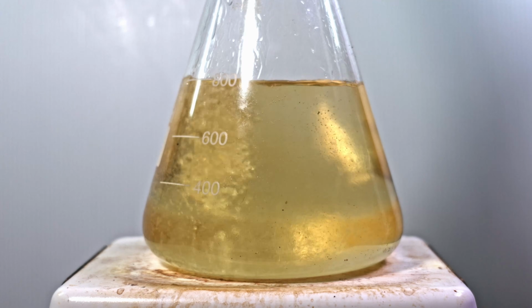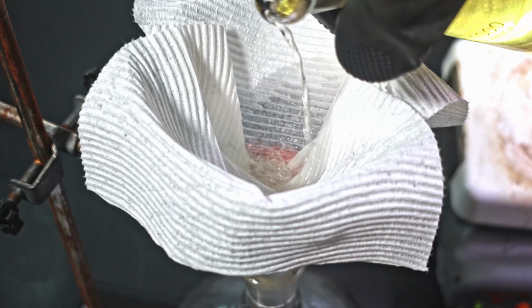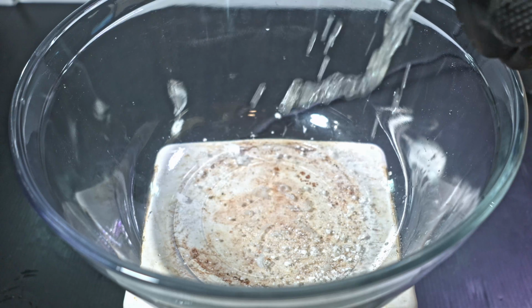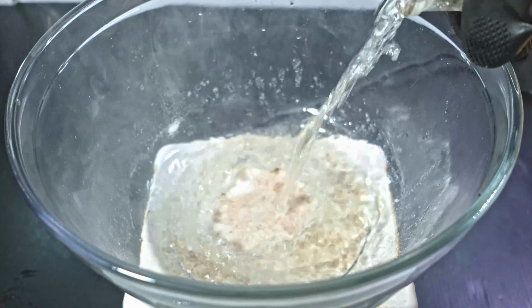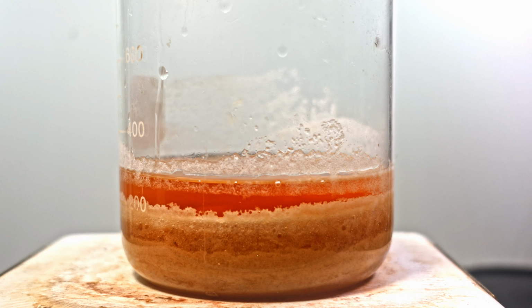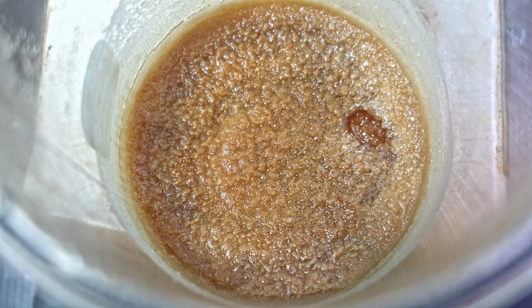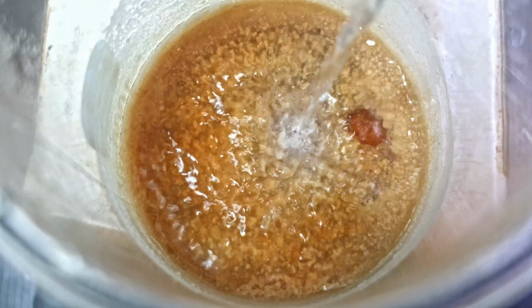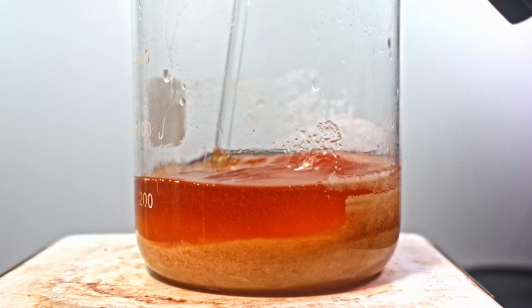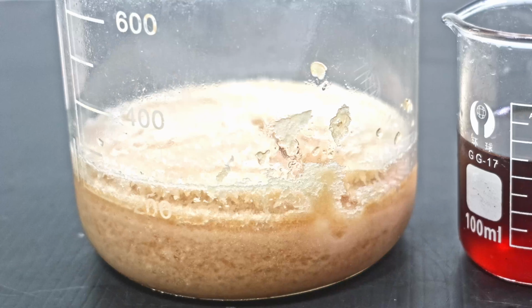One thing I noticed was how many particulates there are. I don't know how they got there, so I filter it all again. I pour it out into a big crystallization bowl for a while, only to end up finishing it in a beaker. I ended up overboiling, leaving a hard hydroxylamine salt crust on top. I add some pure methanol to break it down and extract the weird colorants that are in the salt. I can't believe that gross red stuff was actually in there.